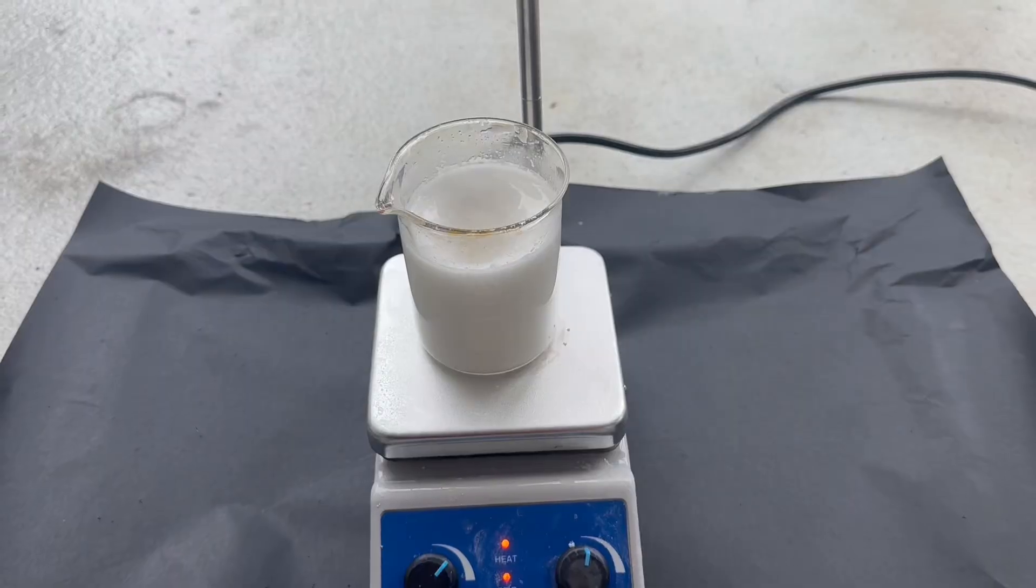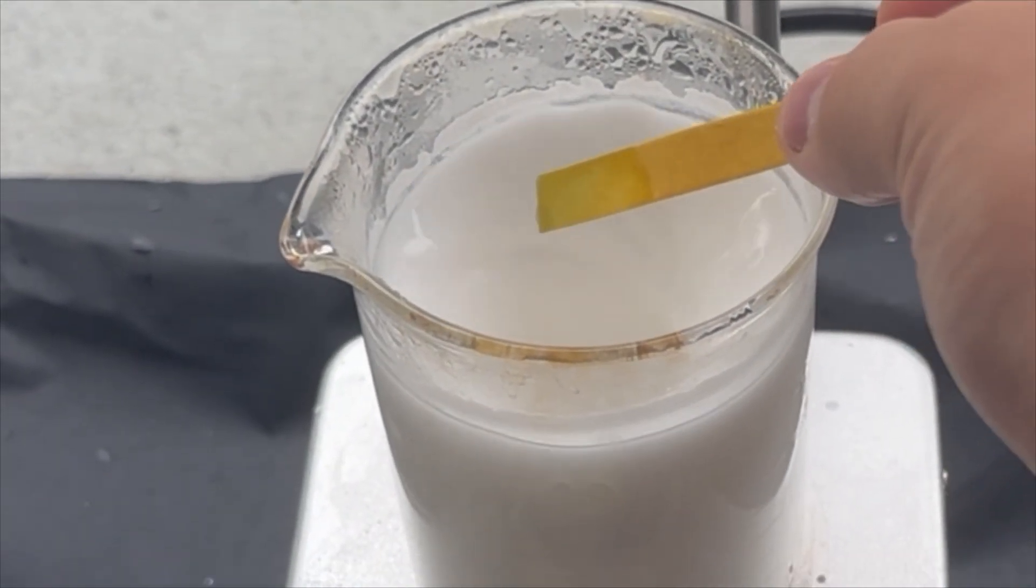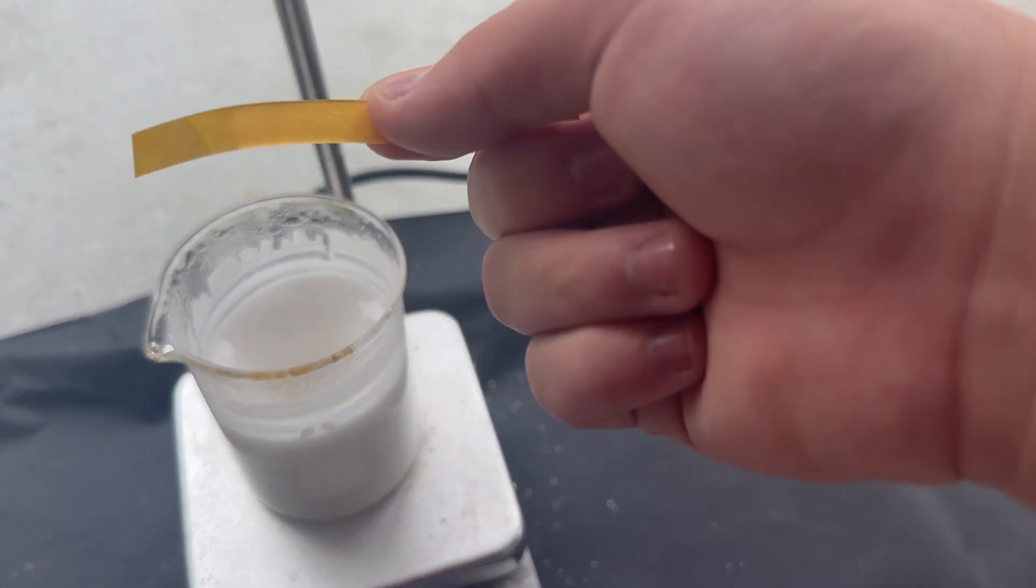The ammonia causes toxic fumes, so I do this outside. When I hold a pre-wetted pH paper above the solution, you can see it turned green from the basic ammonia. I stop heating it when the green barely registers.